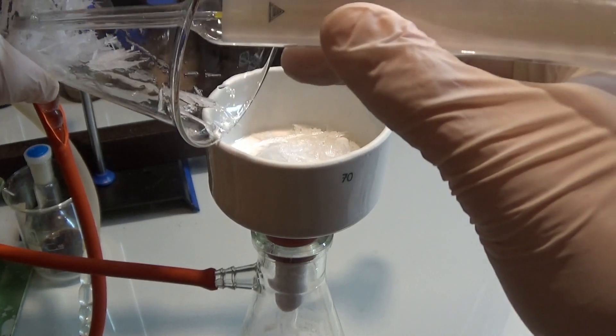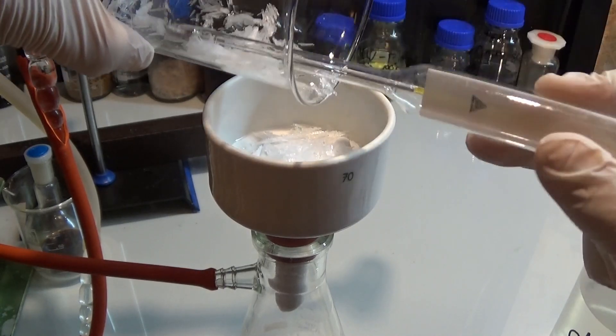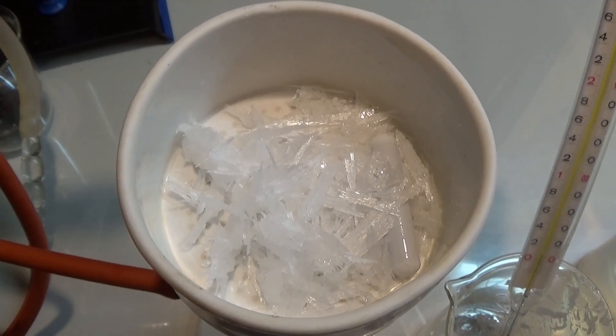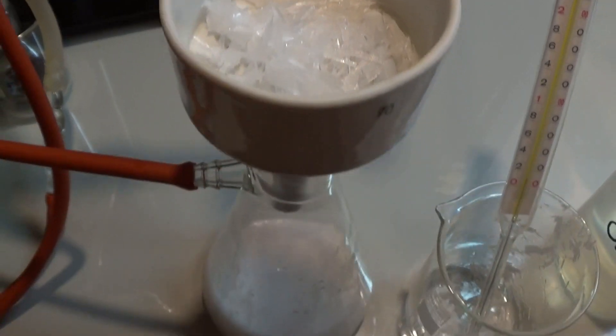The crystals are washed twice, once with 40% ethanol and once with water. The water washing leads to some of the still dissolved substances crashing out and forming a milky mixture.